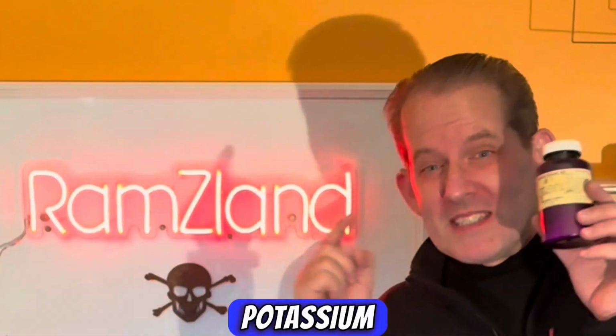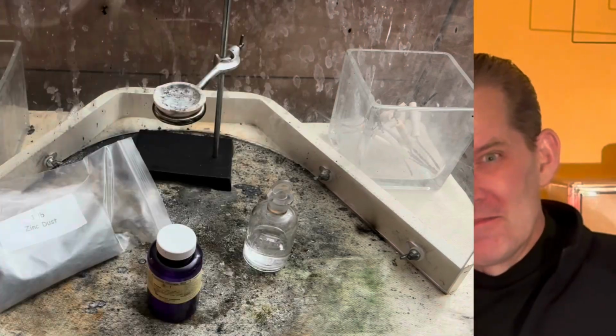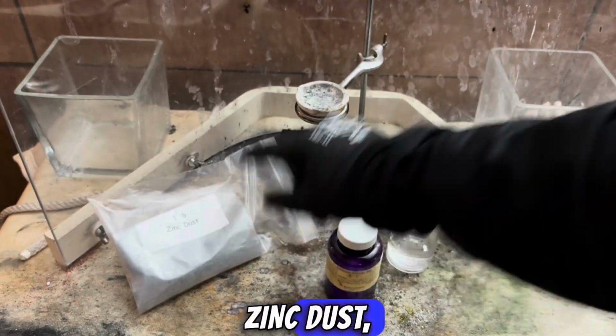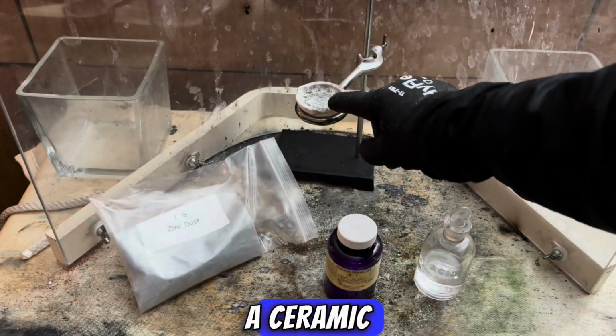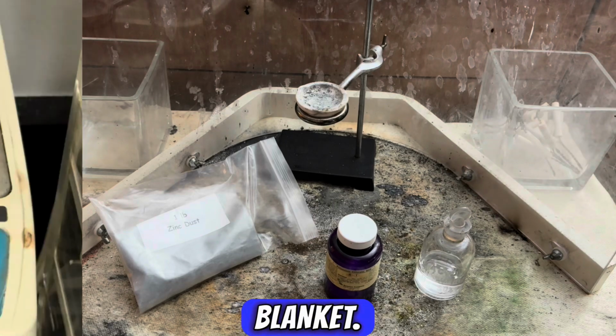What would happen if we mix potassium chlorate with zinc powder? Let's find out. In this experiment, we'll use potassium chlorate, zinc dust, 18 molar sulfuric acid, a ceramic crucible stand, a blast shield, and a flame retentive blanket.